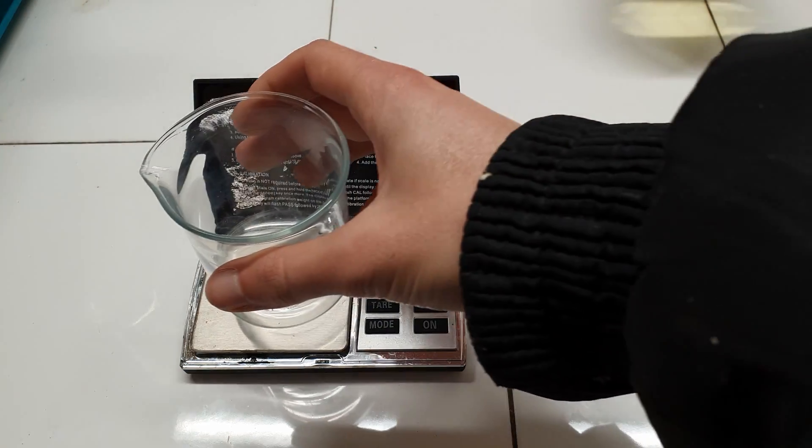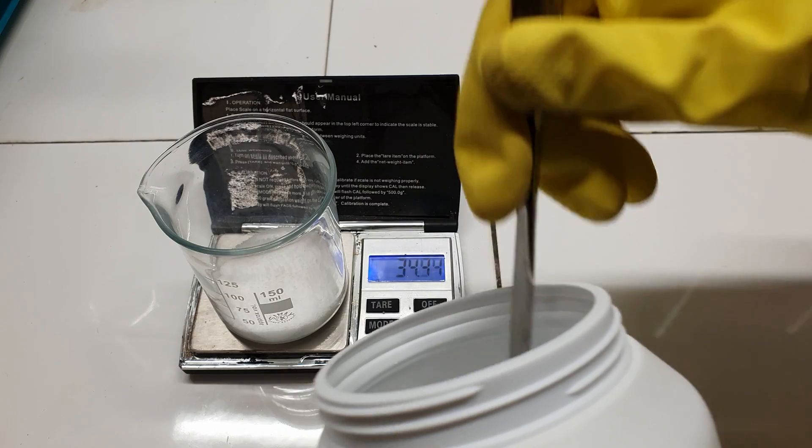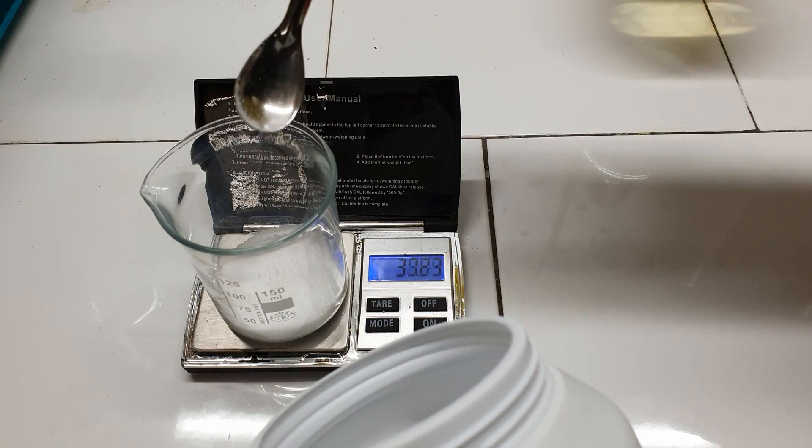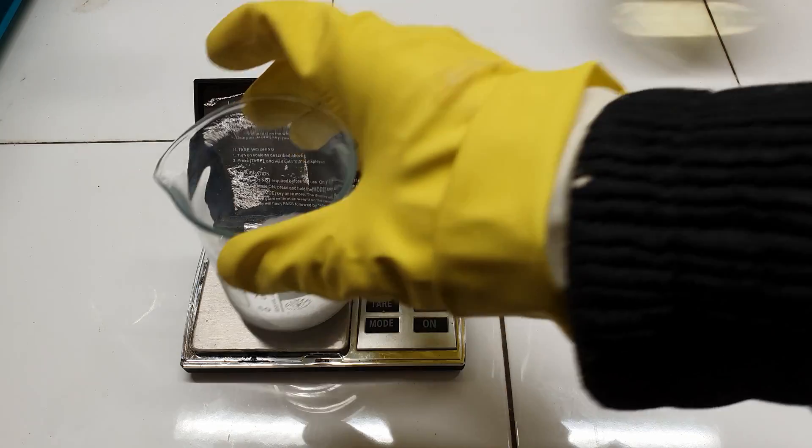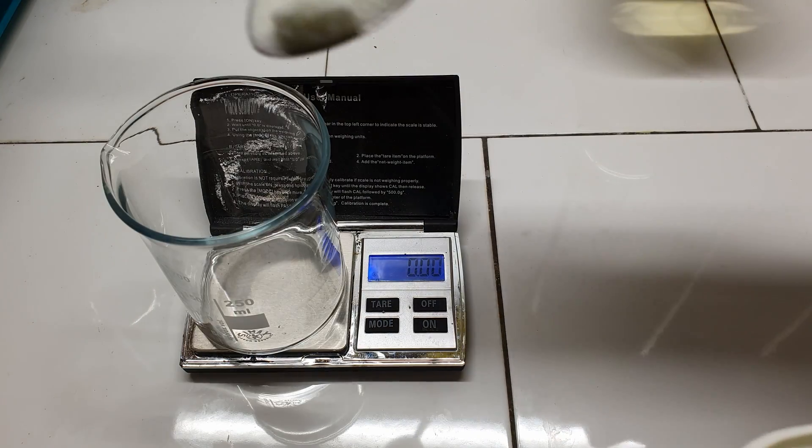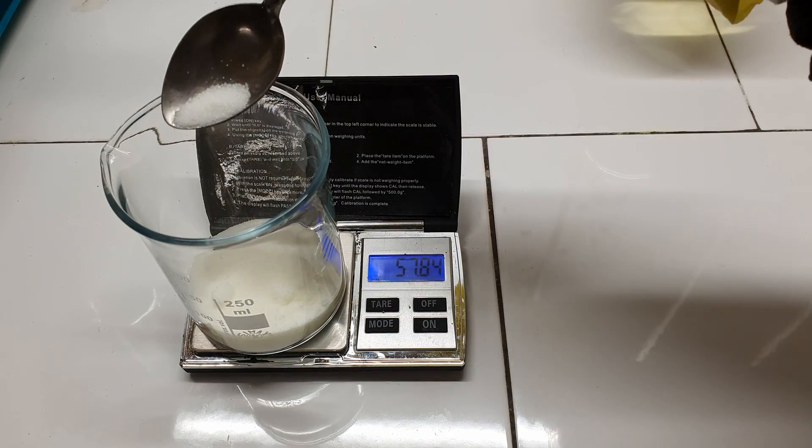To start off, I measured out in a beaker 40 grams of sodium hydroxide. I also measured 59 grams of sodium nitrite.